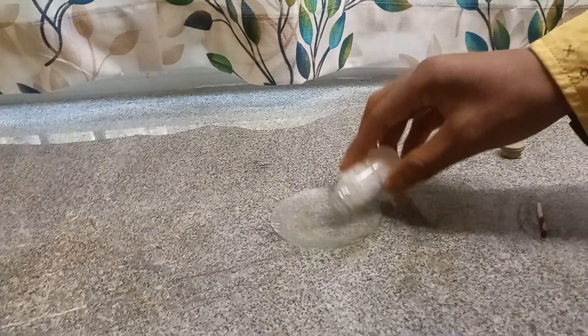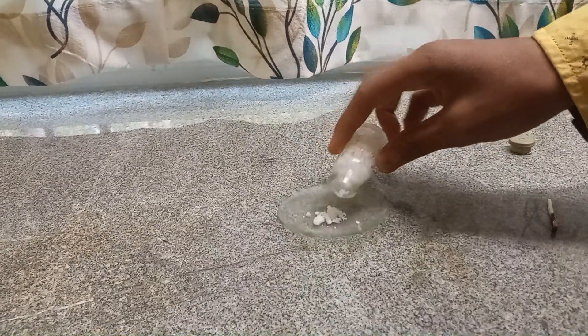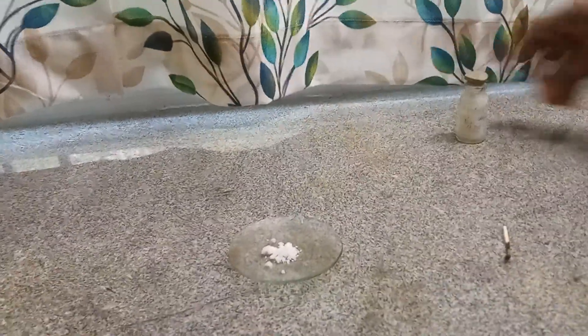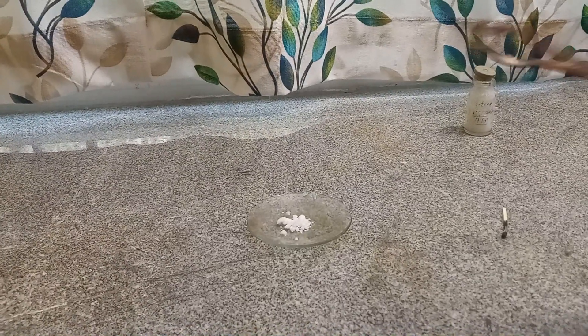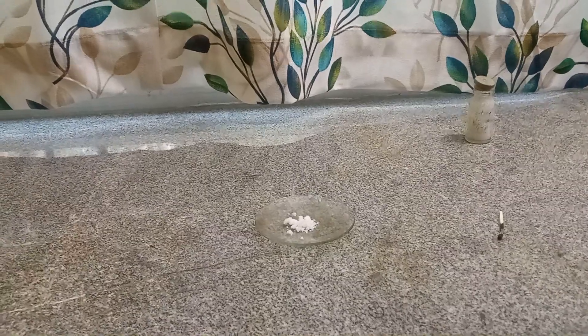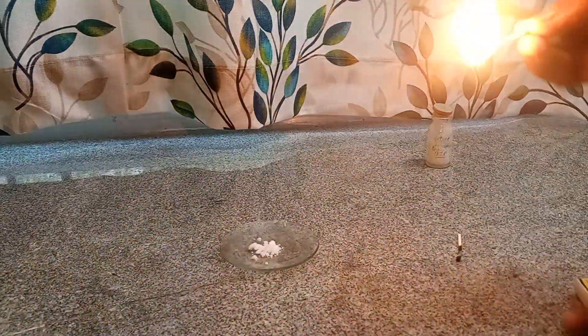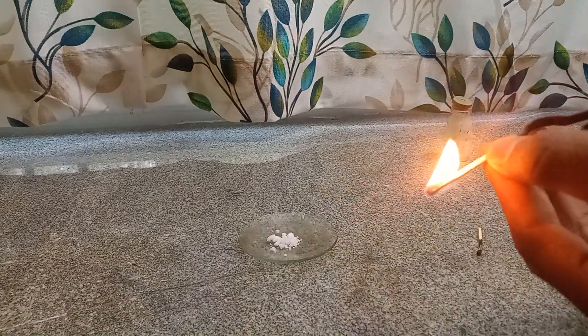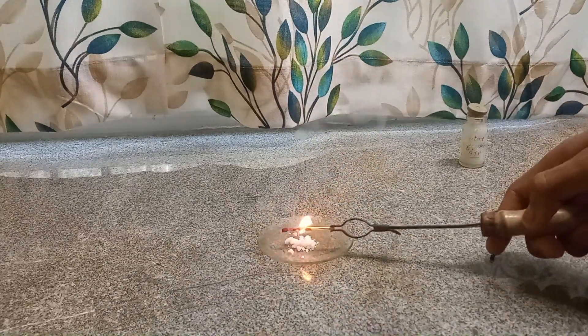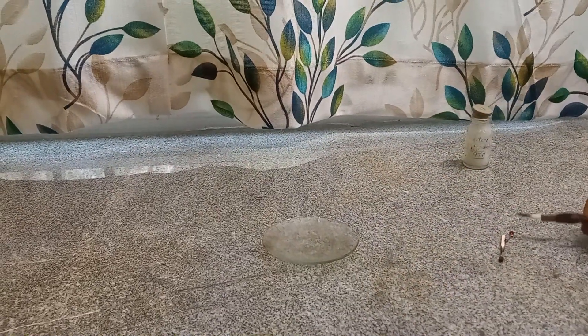Let's do it once again. This time I took a large amount. It's now just sweating. This time I will do it from a distance using this testy holder. Three, two, one. Do you saw that? Now this is one property of triacetone triperoxide.